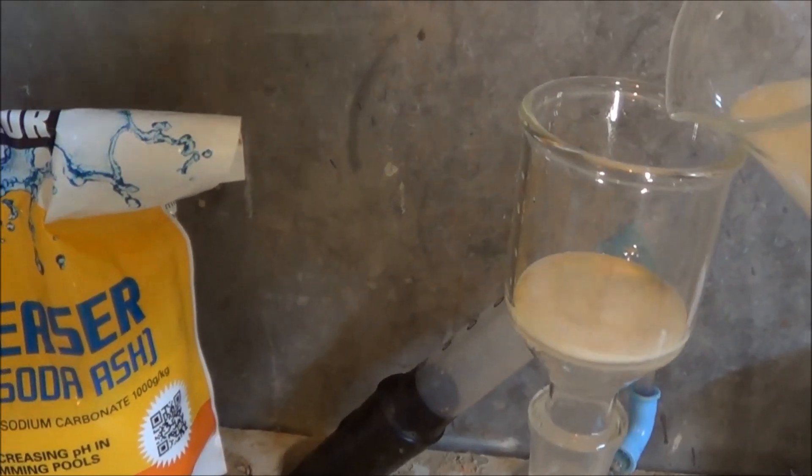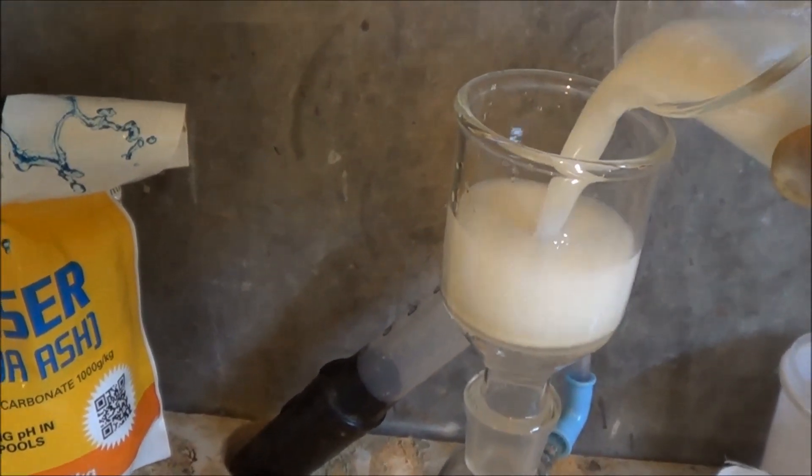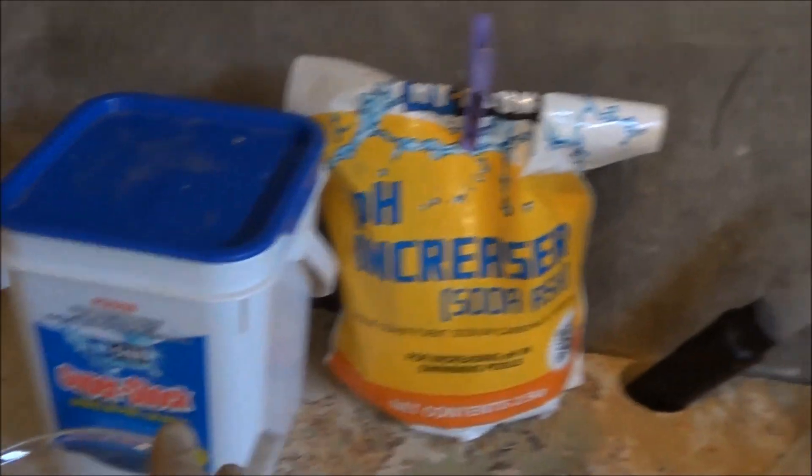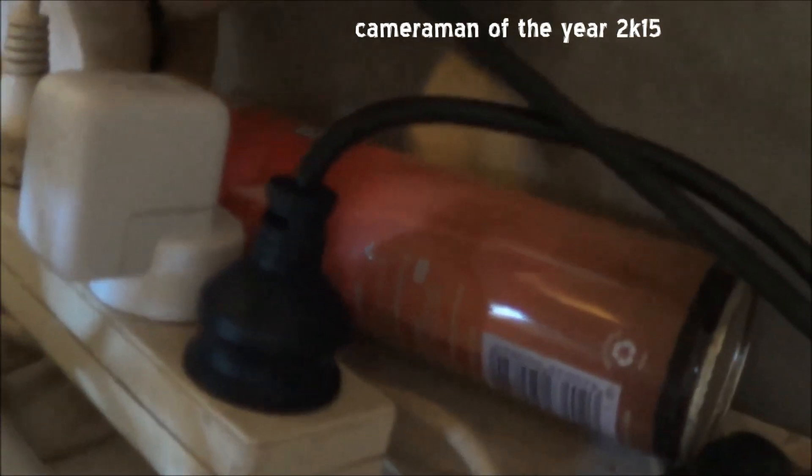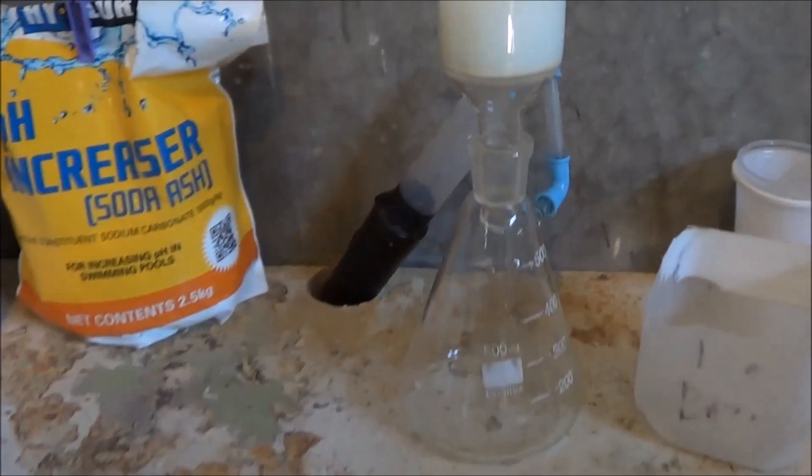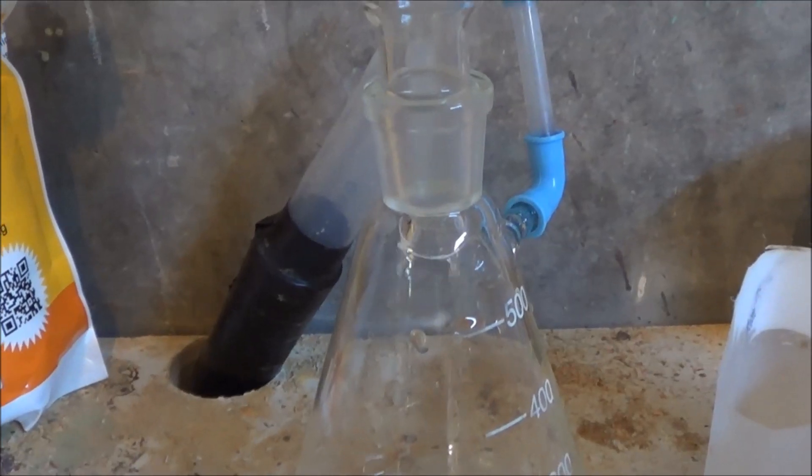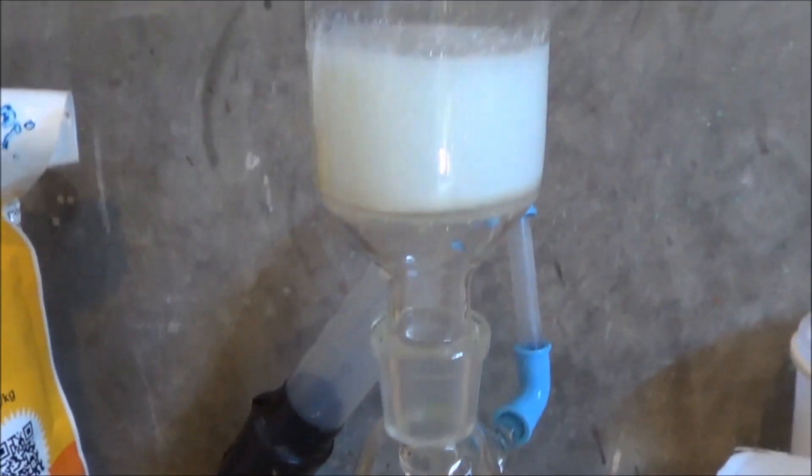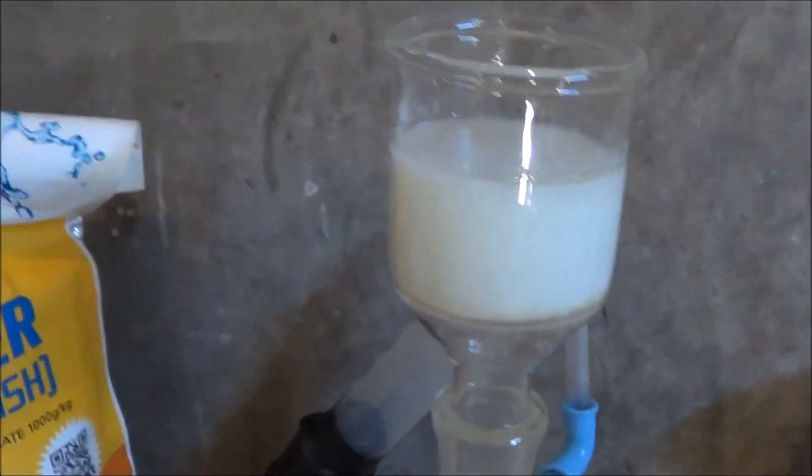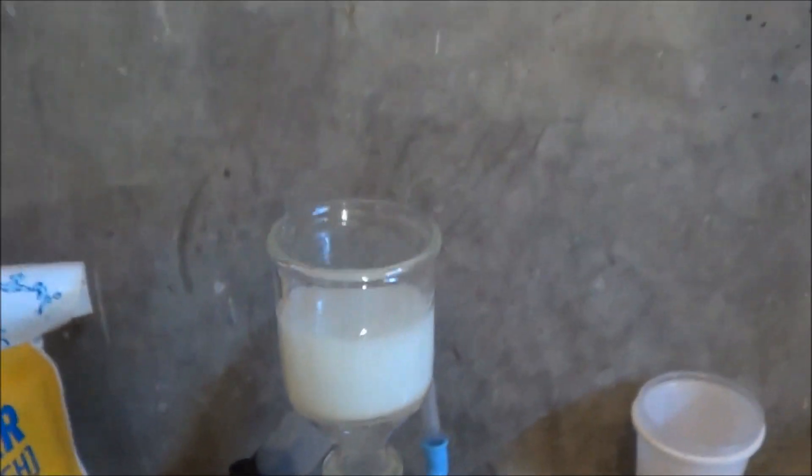Now it's all precipitated out. It's very, very thick. We get to filter it. You may have seen my setup already. We put our thick liquid into there, turn, and you can see it's very, very slow. And that'll slow down even more. So, this will probably take half an hour. I'll skip over this because watching this with the sound is dreadful.